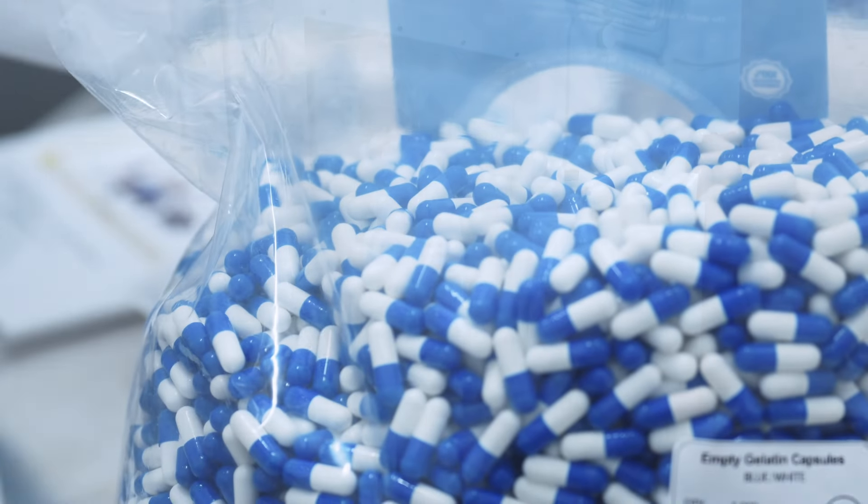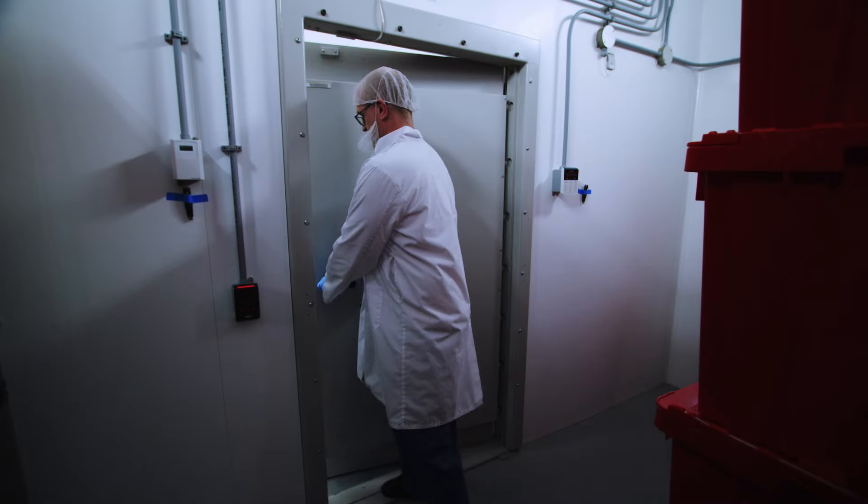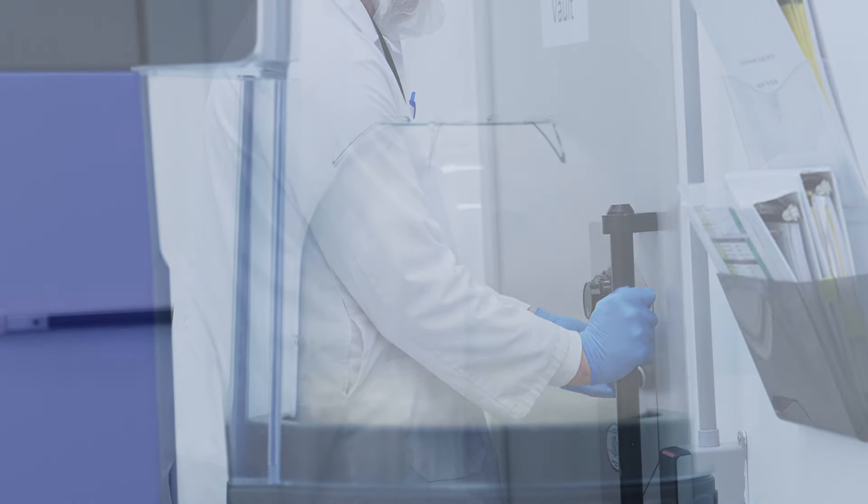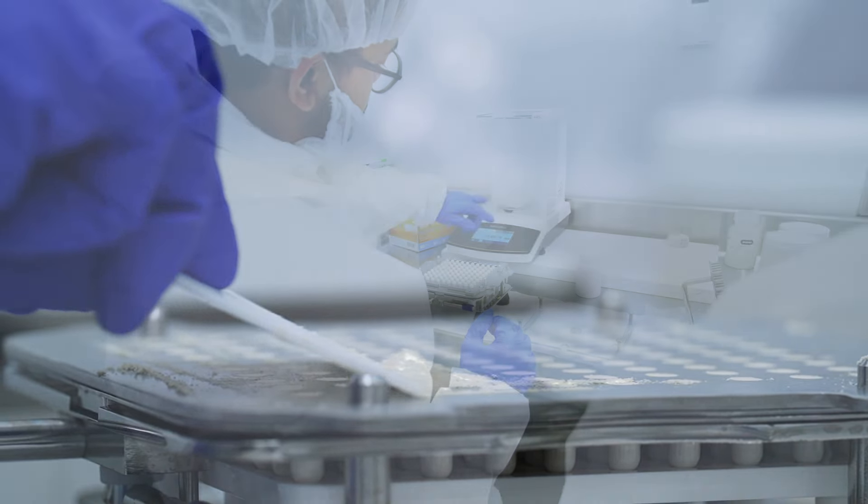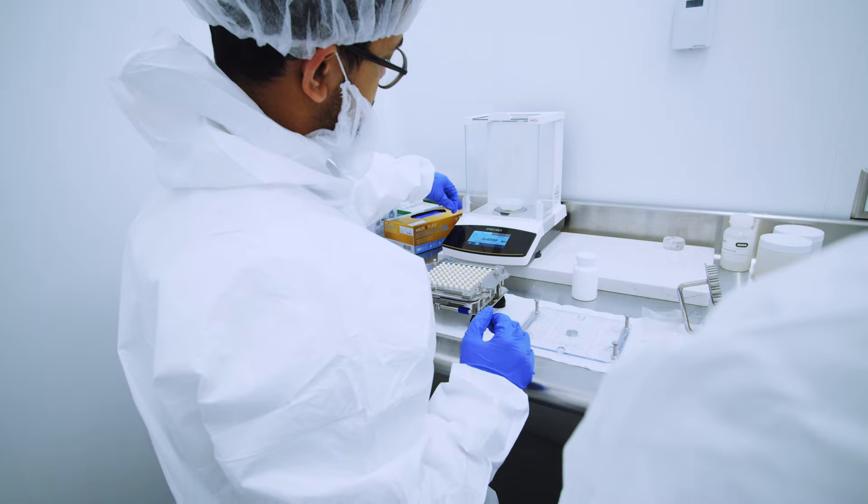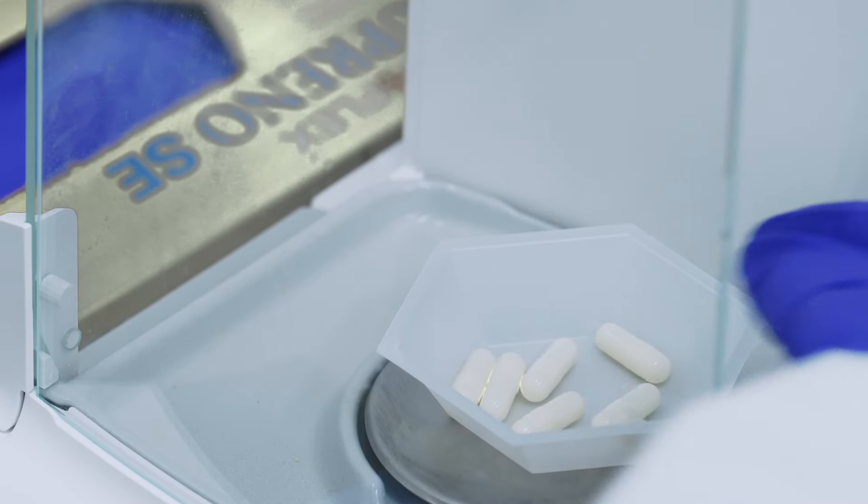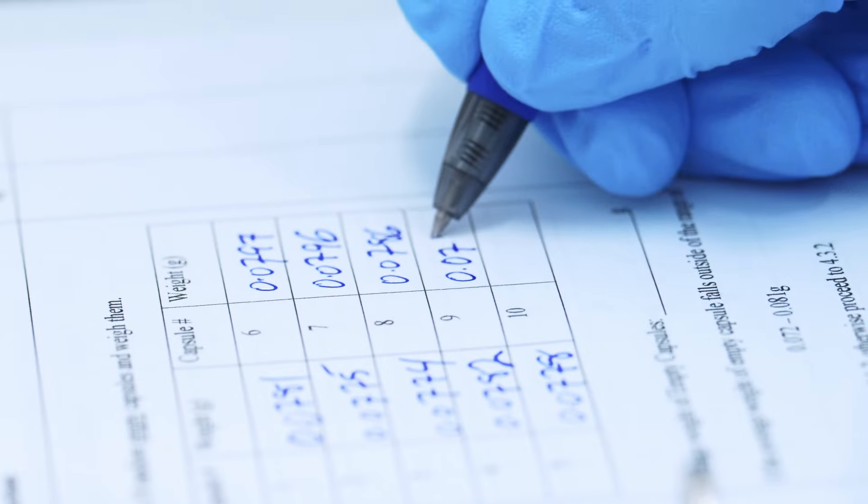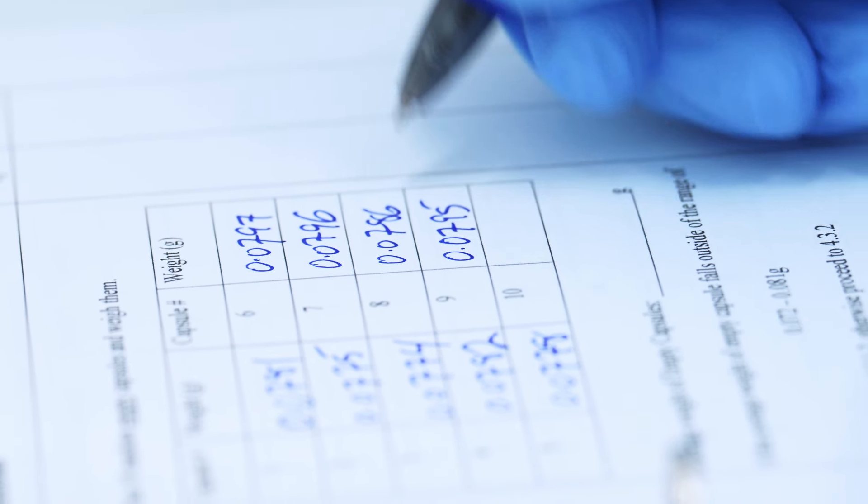That's the entirety of the encapsulation process, taking you right from the vault where we store all of our APIs, transport of the material, blending with excipients, making our blend homogenous, encapsulating, and then finally doing our quality control checks to ensure that each of the capsules is perfectly weighed so that the dosage is right and the quality is as high as we can get it.